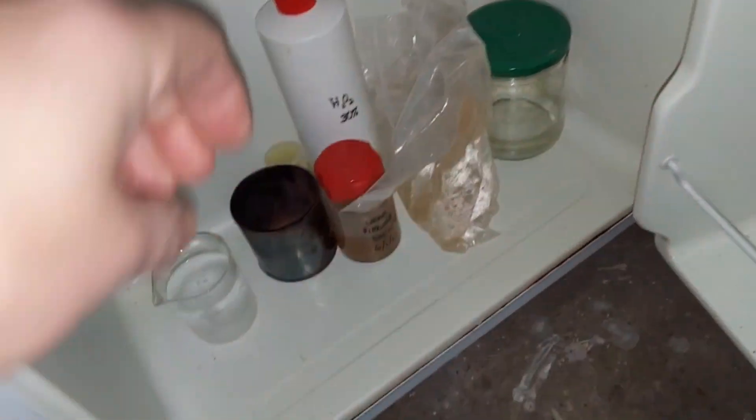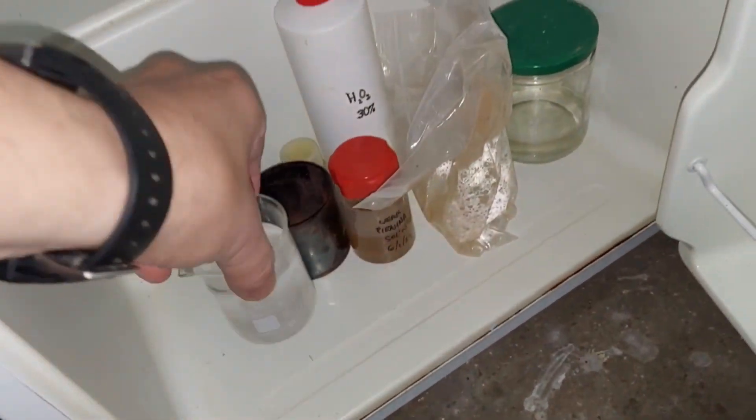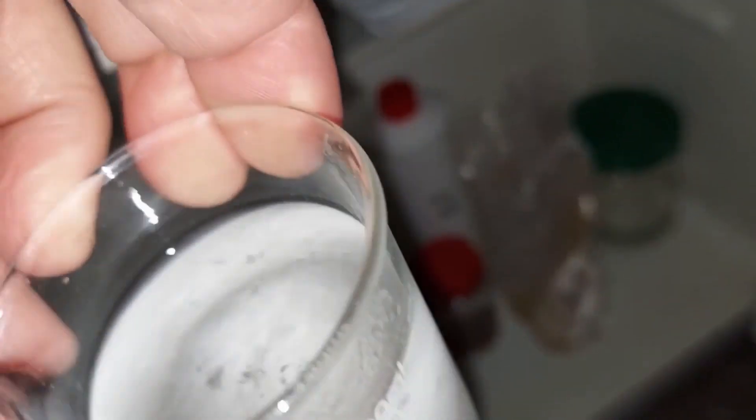Okay, it's been exactly two hours here. Let's take a look. Oh, there we go. Look at those nice crystals there that have formed. They're potassium persulfate.